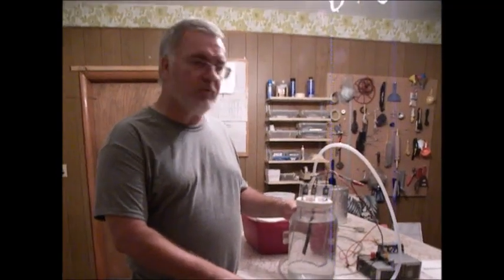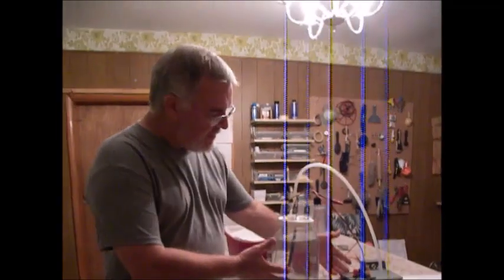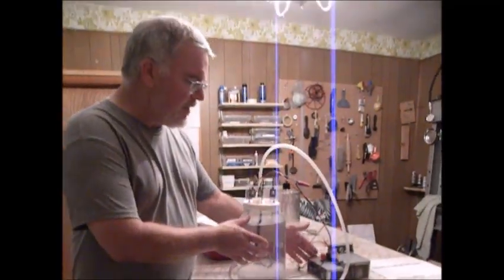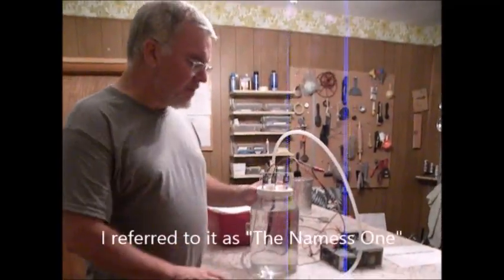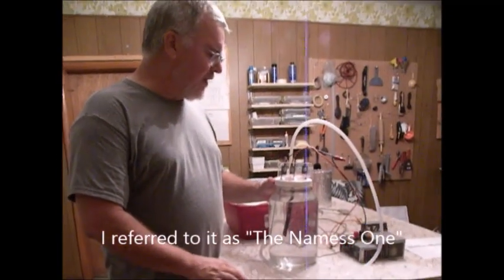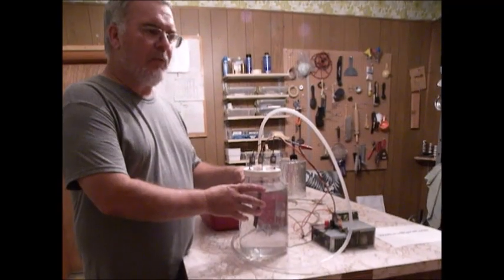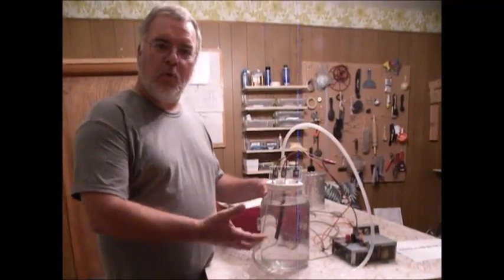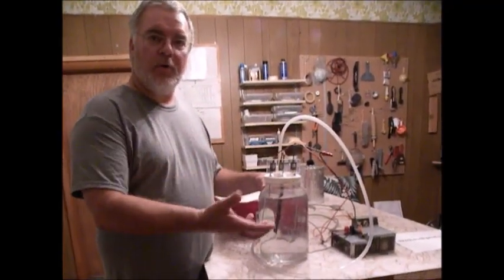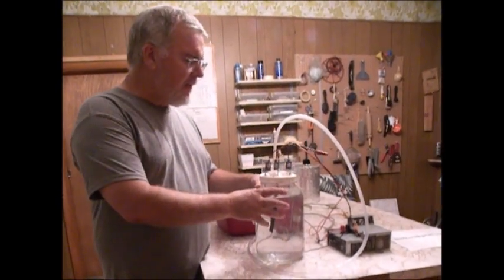That being said, this is the cell that I was using right here. I have a prototype that was given to me with a couple things in mind. When I got it, they were curious if the normal Jane and Joe could operate this cell with limited instructions, and then they were curious how long the cell would hold up before it may quit working.